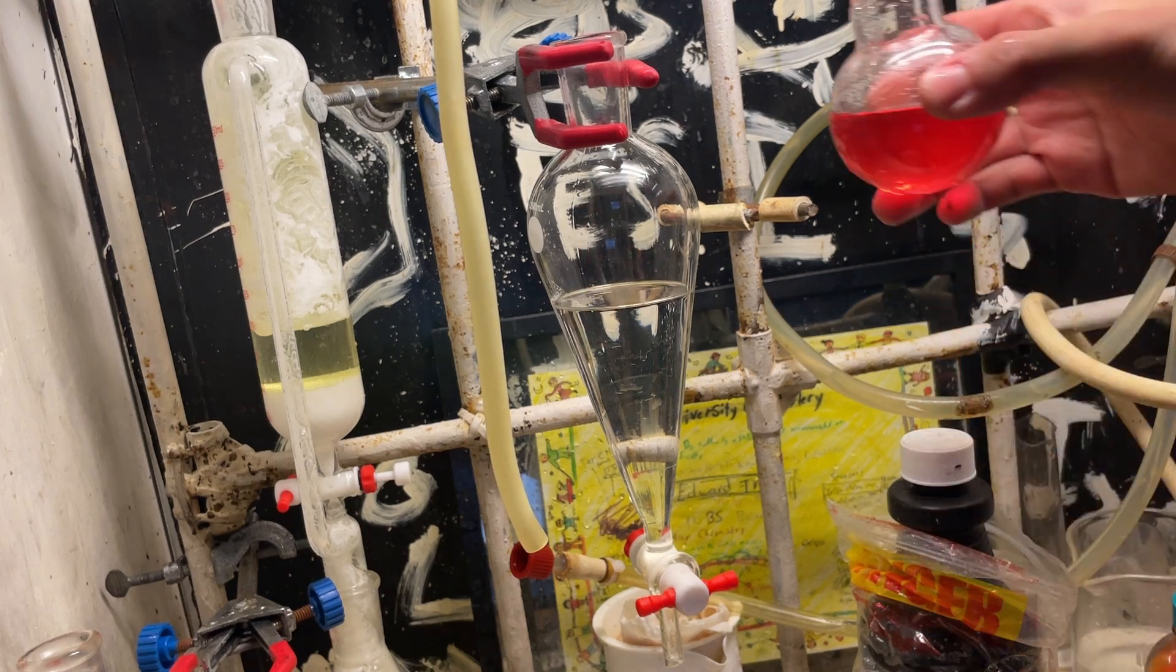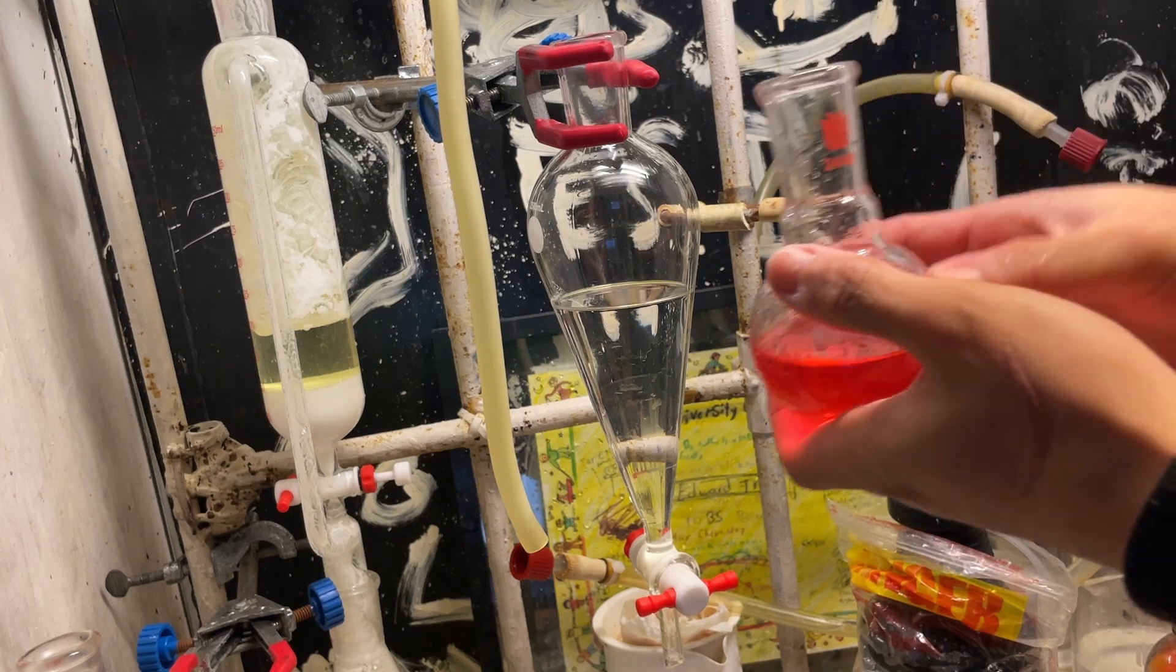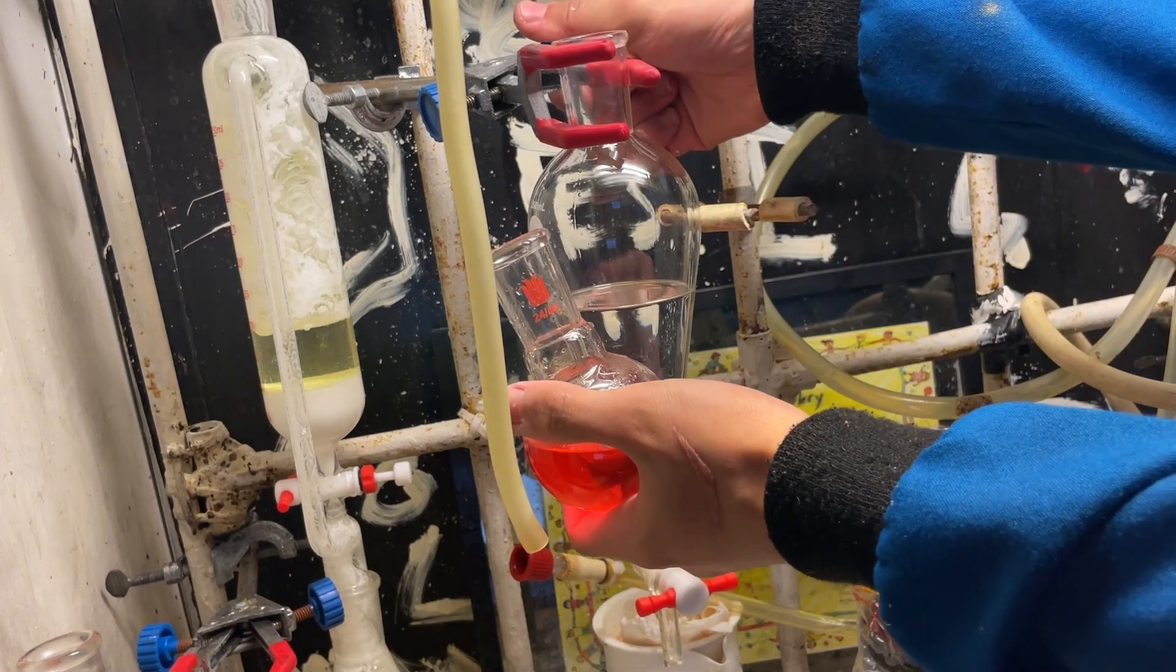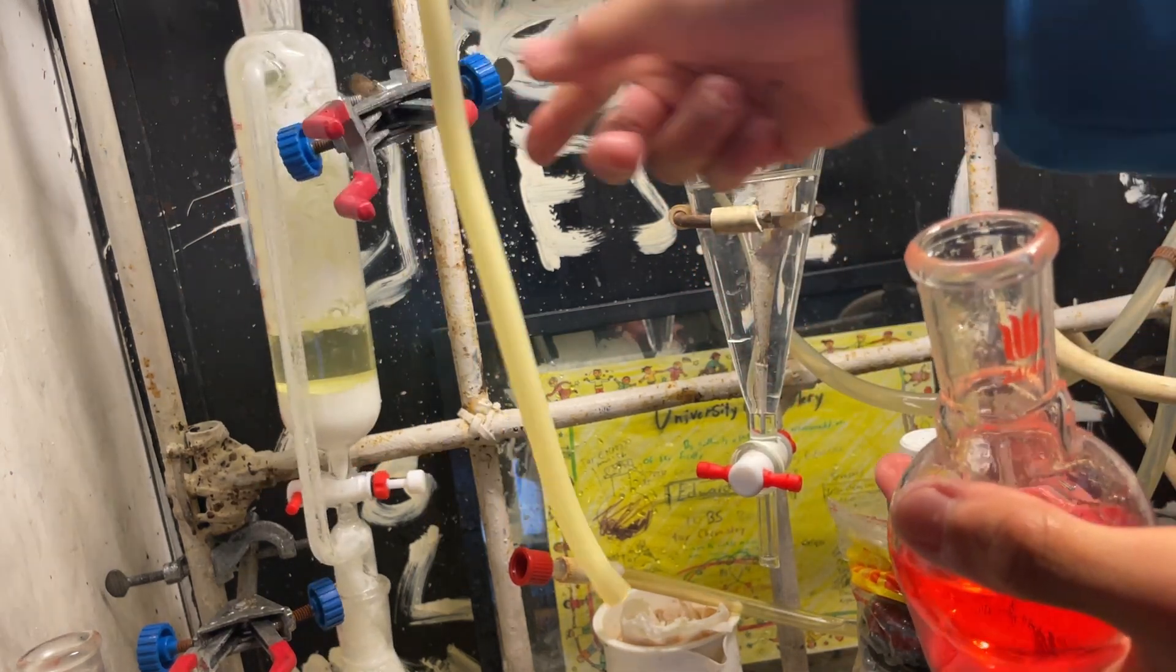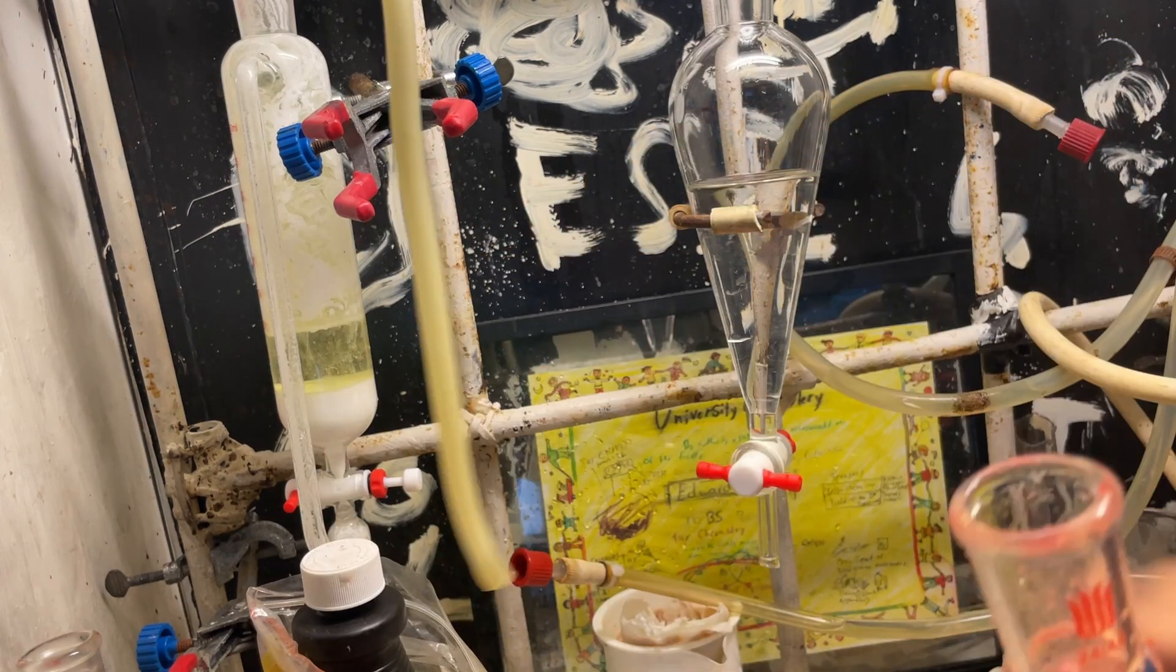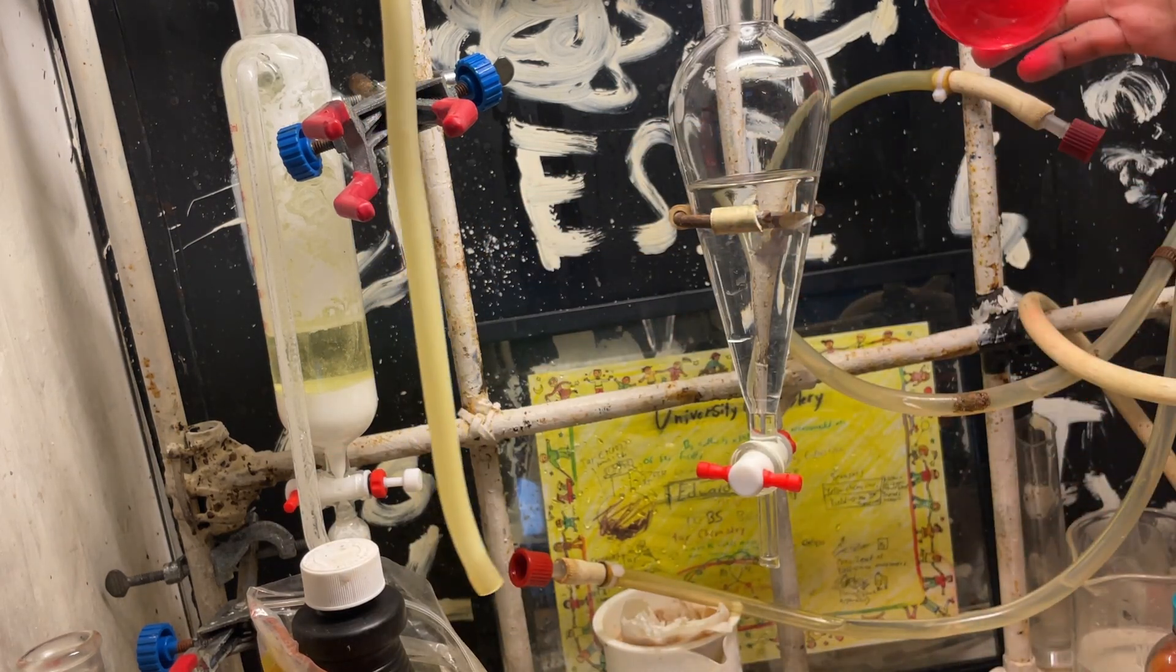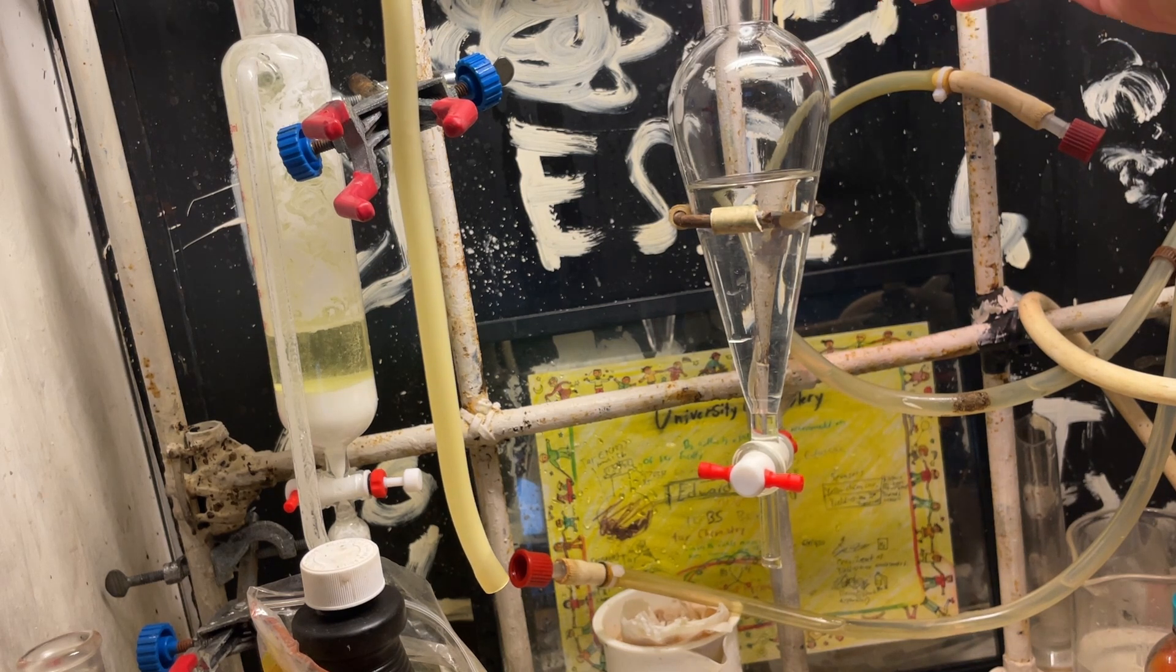Because, from experience, this stuff reacts quite wildly with sulfuric acid. But, so I'm actually going to move the sulfuric acid. And there's a hole that we're going to add our sulfuric acid very carefully. Perfect.